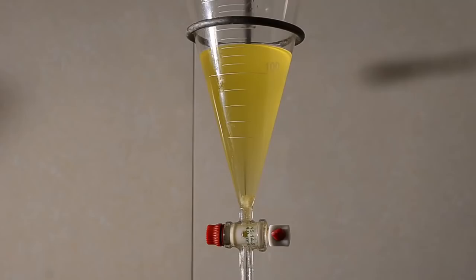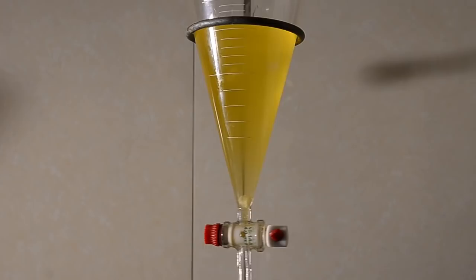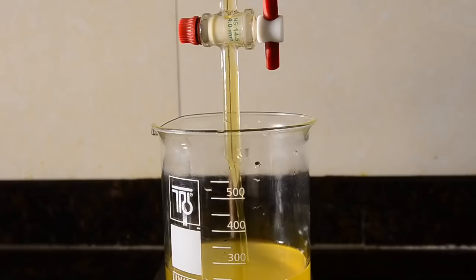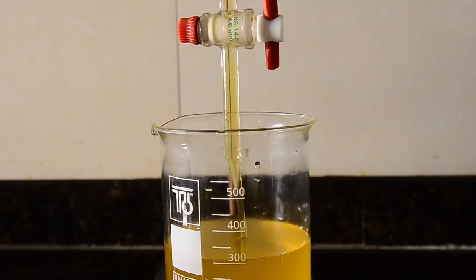Now take 100 mls of your quench sodium hydroxide solution and add to the separating funnel. This will rapidly hydrolyze any bromoacetone remaining in the aqueous layer. Then dump the contents of the funnel into the remainder of your quench solution. After a few minutes the toxic bromoacetone is hydrolyzed and you can safely dispose of the solution.